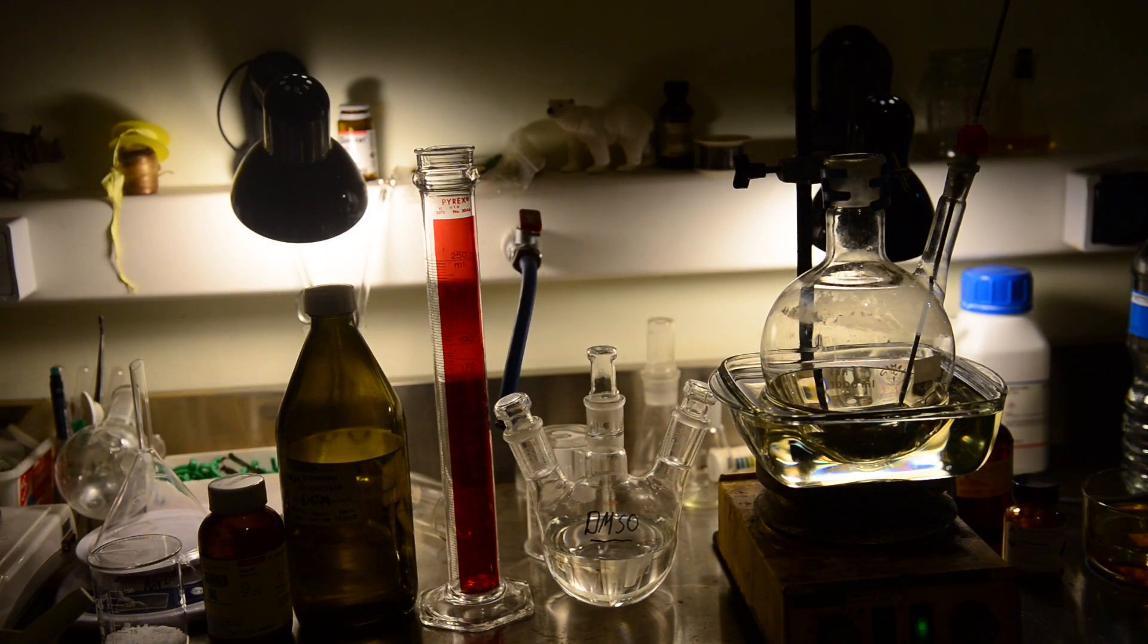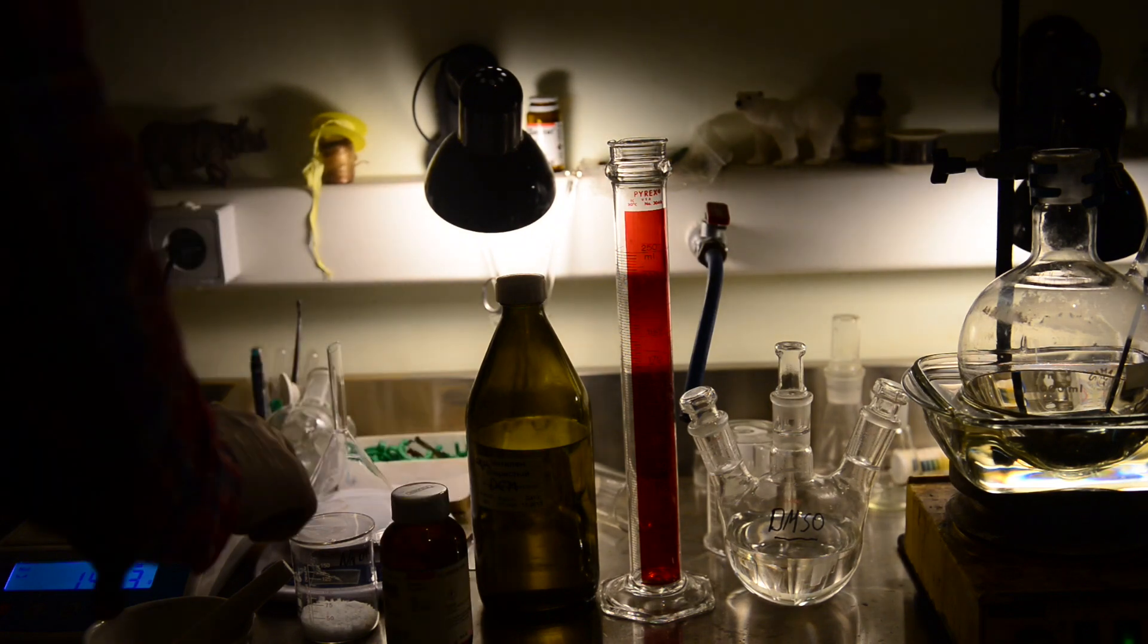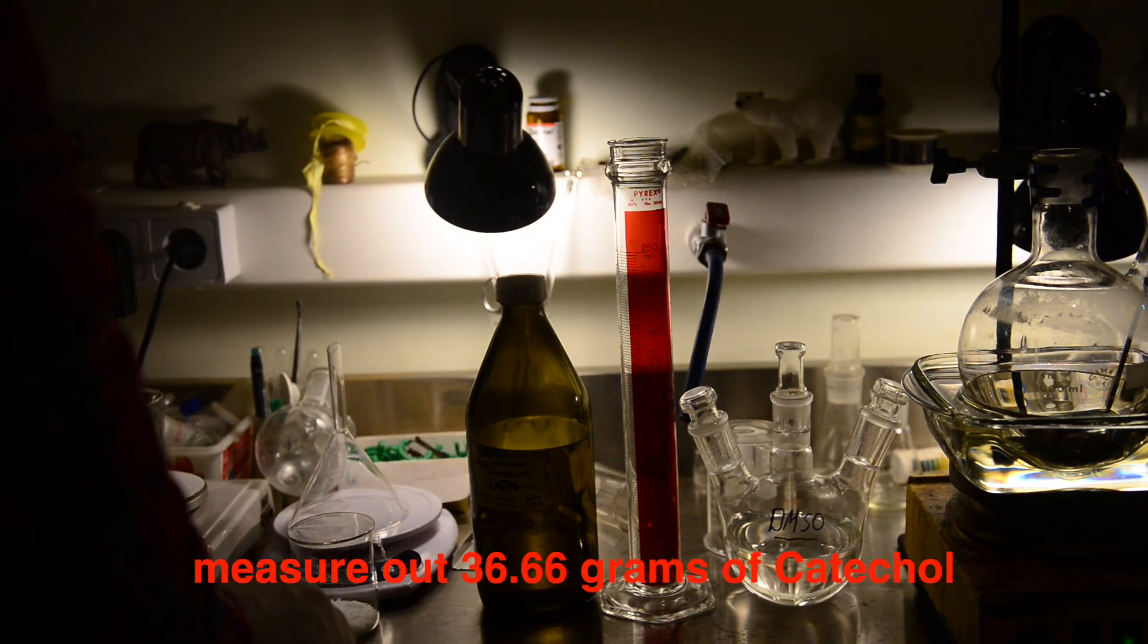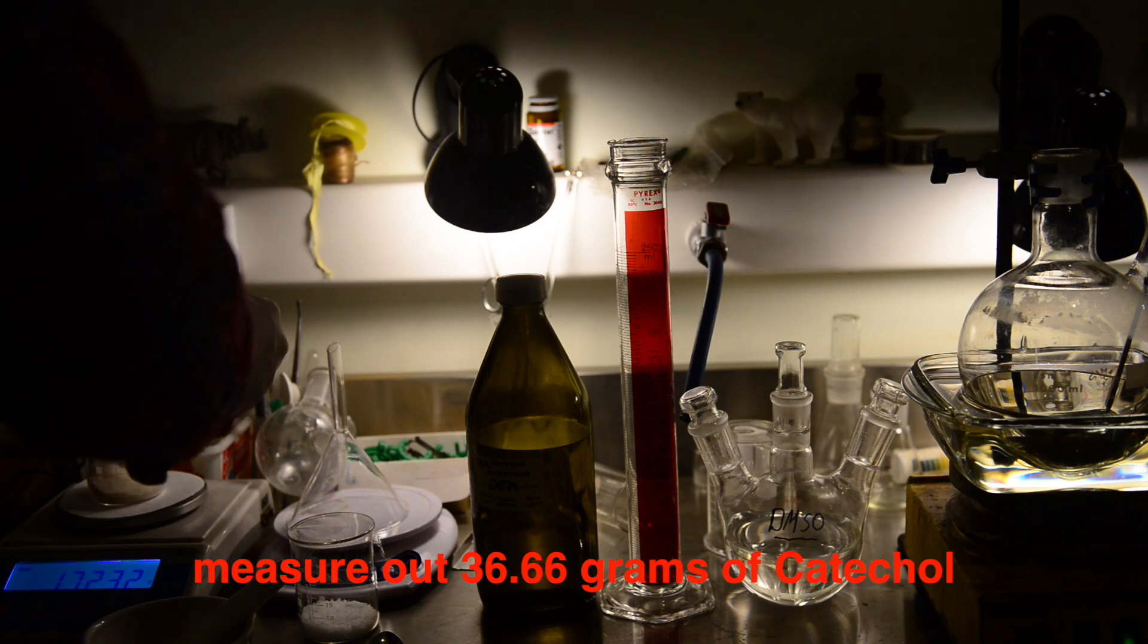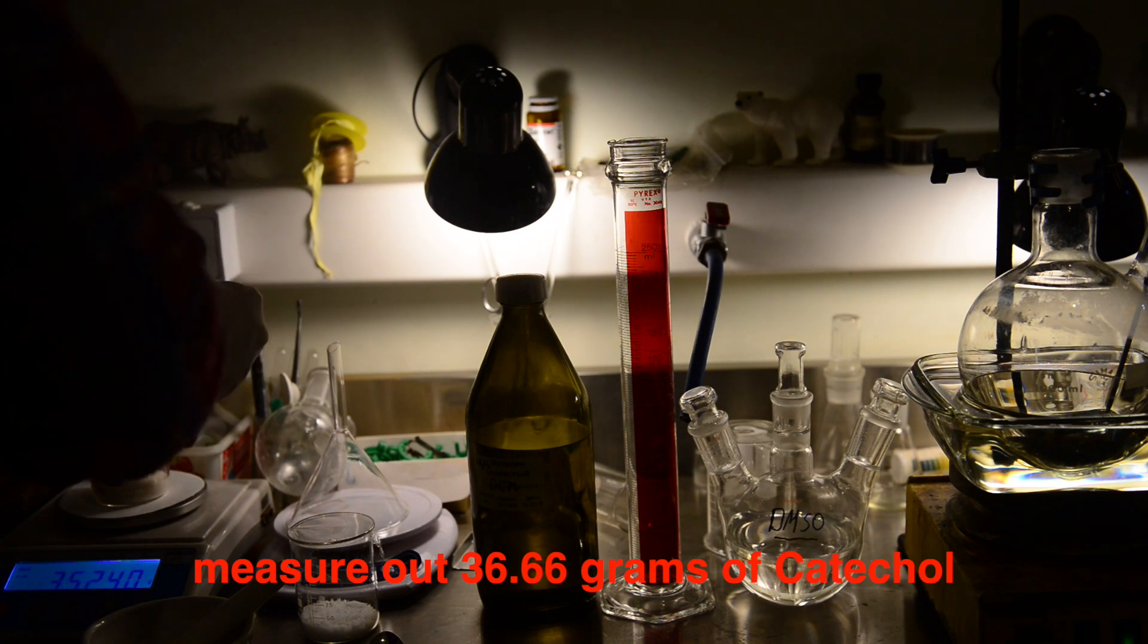In the last experiment, we proved the viability of this method. We have decided to give it a try on a larger scale again. We think we have improved our technique after the last successful run. The reagents presented on the table are the same. We have taken the same amounts as we did the first time.